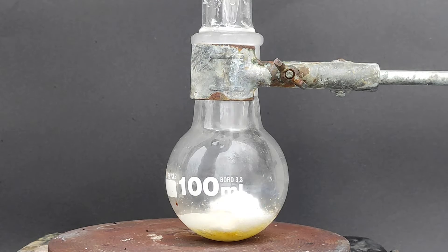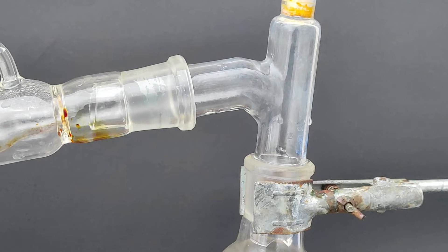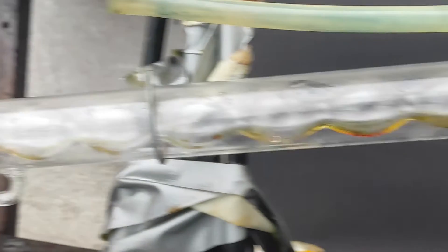To a 100 ml boiling flask I've added the reagents. Then I've added a distillation joint, and then an Allihn condenser because I don't have a normal one.